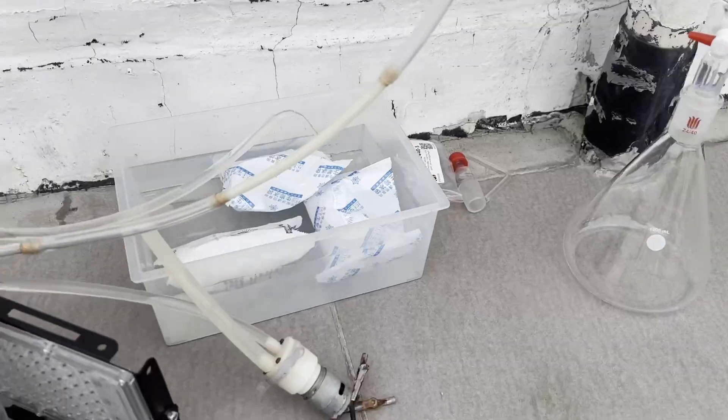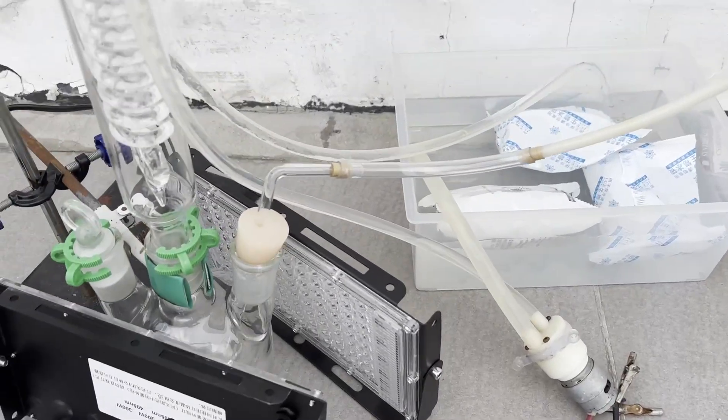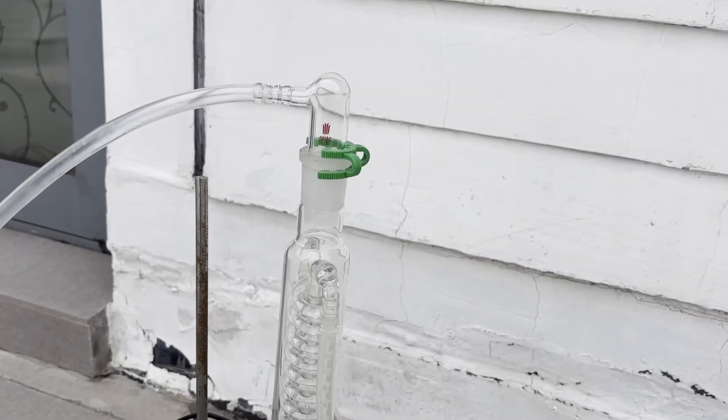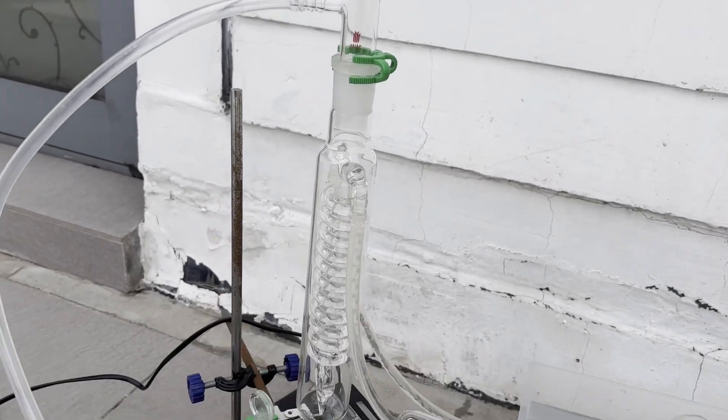Instead of fresh DCM, I'm going to use the carbon tetrachloride that we distilled over last time, so we don't have to add more chlorine to fully chlorinate the solvent, which would allow me to determine the minimal amount of chlorine needed to run the reaction properly.